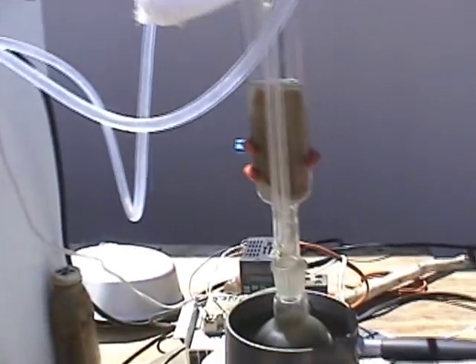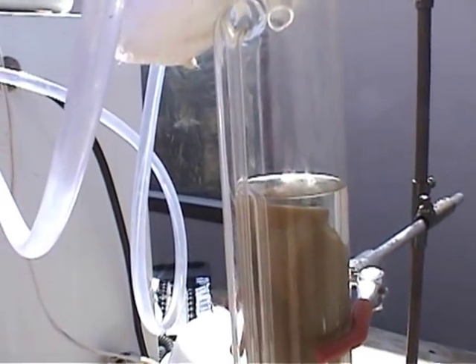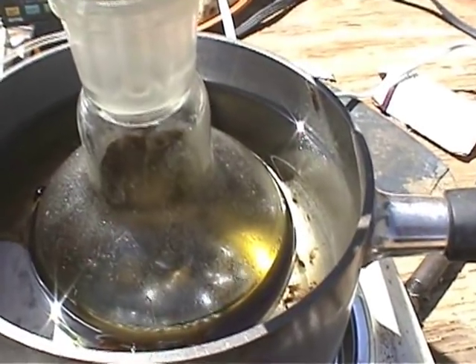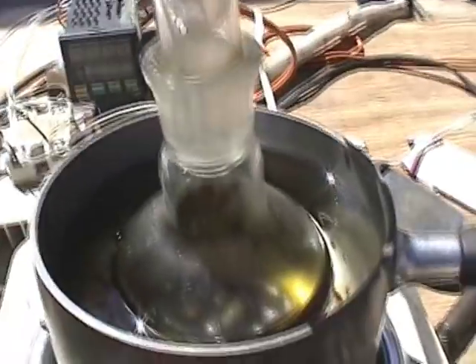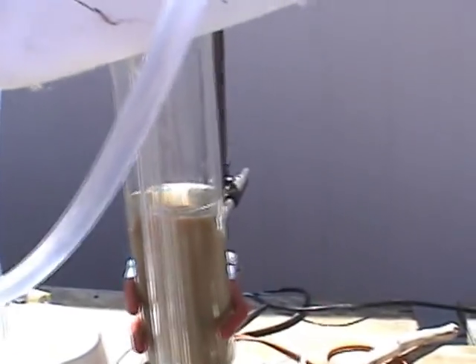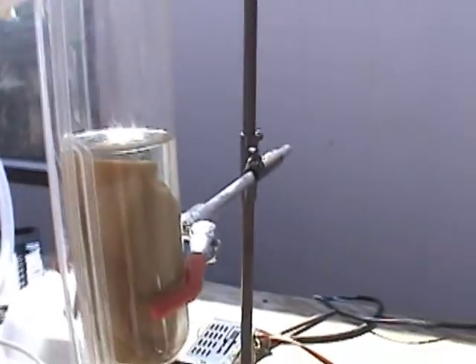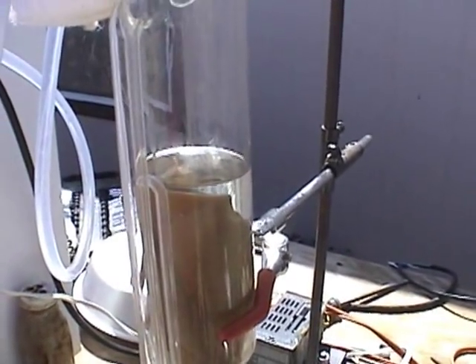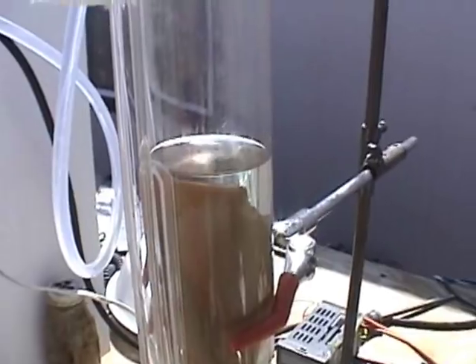I'm back — this is my current Soxhlet setup. You'll see that this thing is just about ready to dump; it's right up close to the cycling tube. My boiling flask is running kind of low and not boiling very much. My temperature is set at about 76°C. I've had this one running for a couple of days — I just didn't have time to come back and unload it. But with the Soxhlet, the beauty is you can just let it keep running and nothing is really going to change, and you don't lose your solvent. It's clear, you can see it's ready to dump.